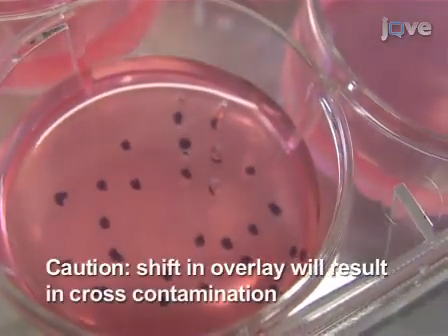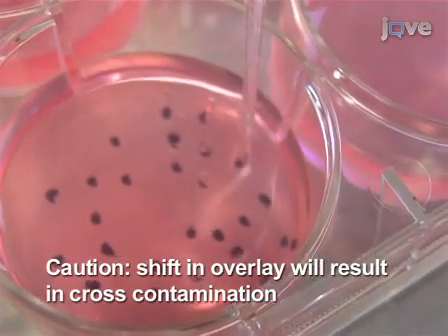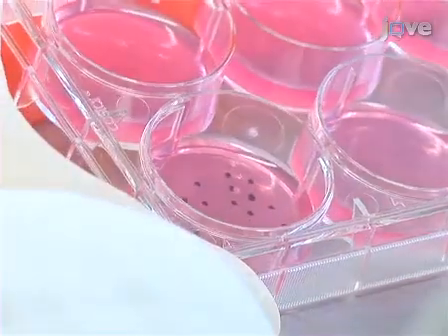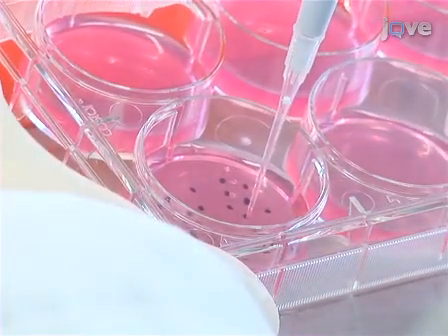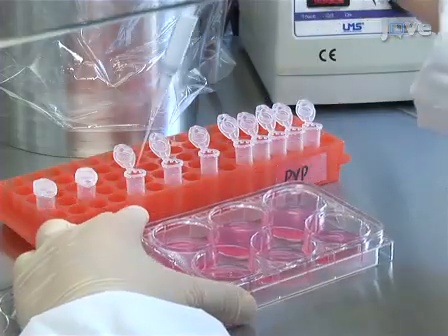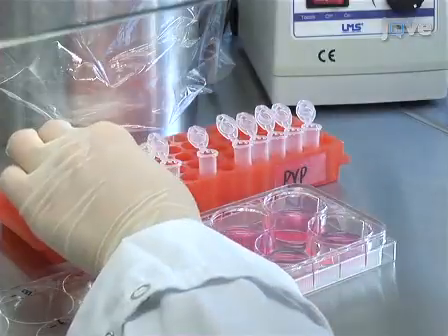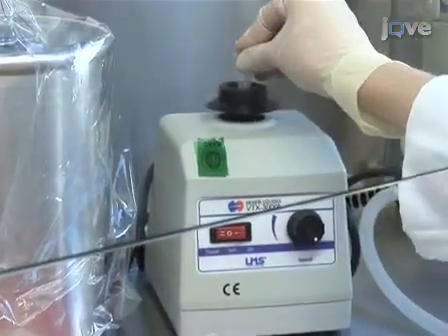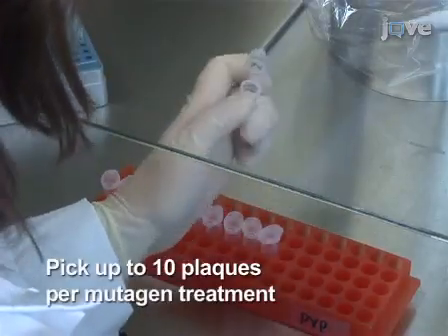Taking care not to dislodge and shift the overlay's position, gently plunge a P200 filter tip through the agarose overlay to reach the plaque. Carefully lift the tip out of the overlay and transfer the agarose plug to a microcentrifuge tube containing 250 microliters of medium. A sufficient amount of virus will be transferred regardless of whether the agarose plug is freed from the tip. Vortex the tube. Pick up to 10 plaques per mutagen treatment.